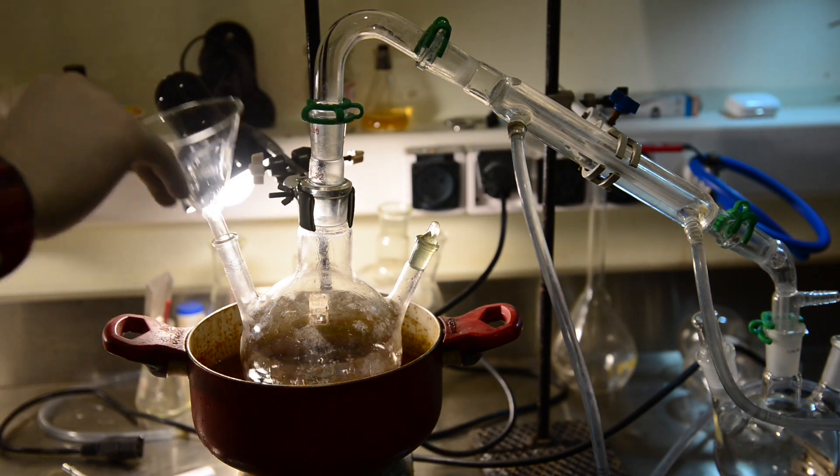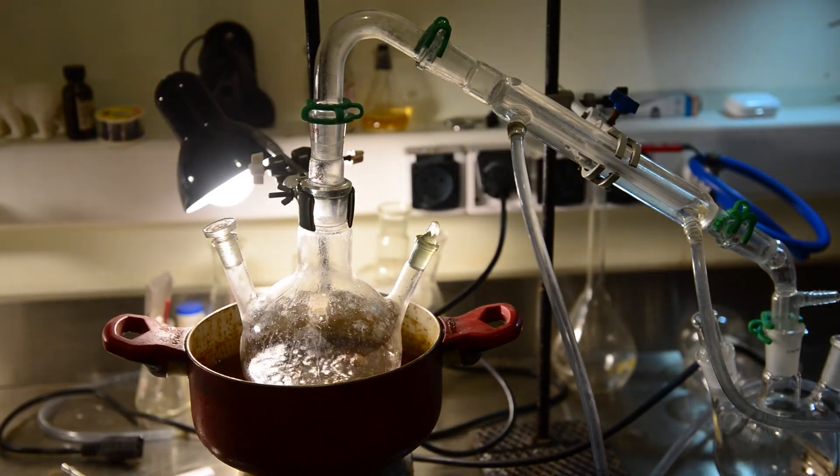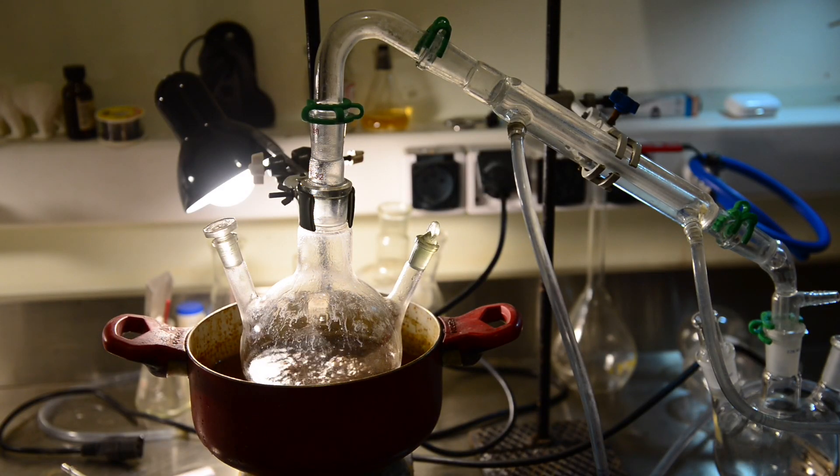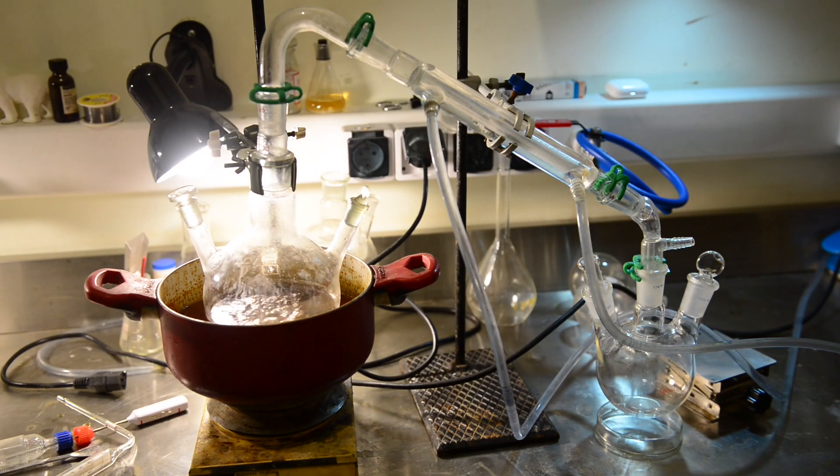We are going to add 300 milliliters of water, but water addition has caused violent boiling, so we have decided to add a half portion at first and the rest later.